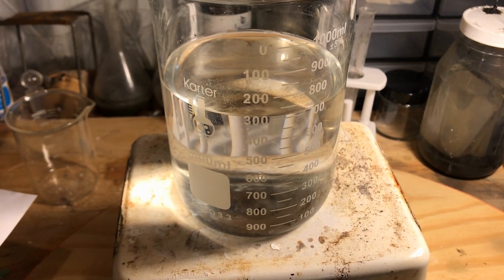Now I would like to say that this is my first time running the reaction with vinegar instead of glacial acetic acid diluted into water. I don't know how well it will work, but it should work. One thing I learned while doing a little bit of research about vinegar for this video is that vinegar is actually made by diluting manufactured acetic acid, because the way acetic acid is extracted is through distillation, which produces glacial acetic acid.